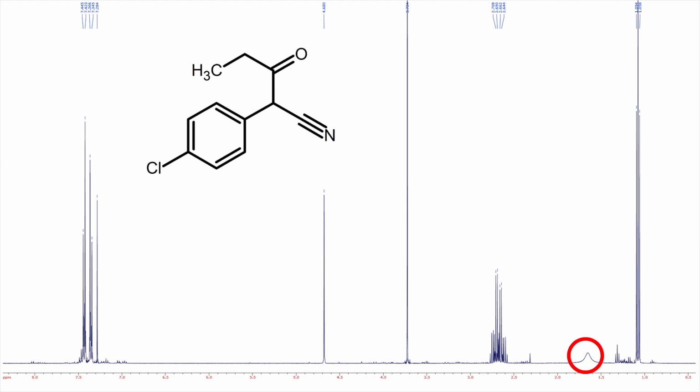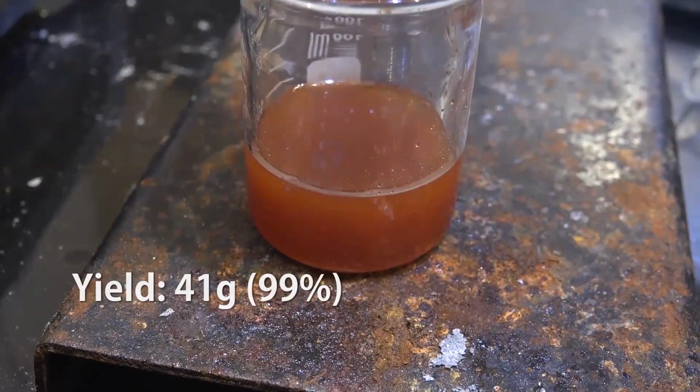Now this broad peak over here is water. For obvious reasons, we have a lot of water contamination. Overall, this spectrum pretty much confirms that we have our desired product. Our yield is 41 grams or 99%.